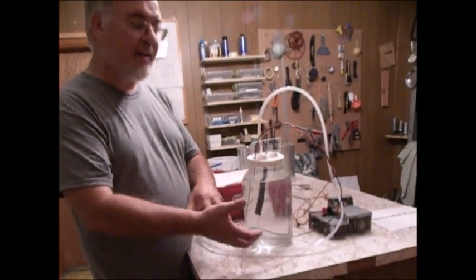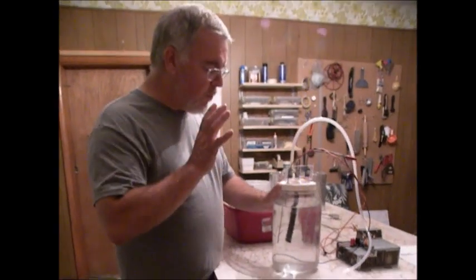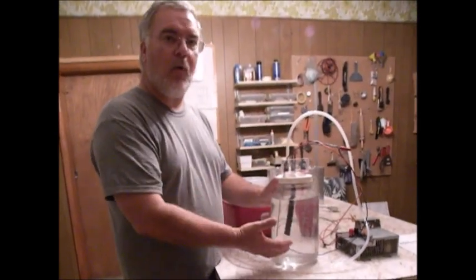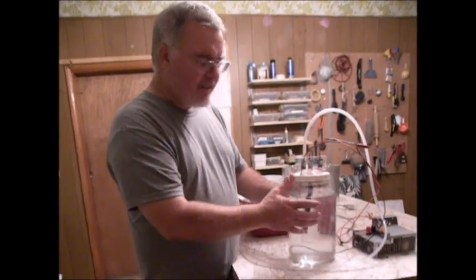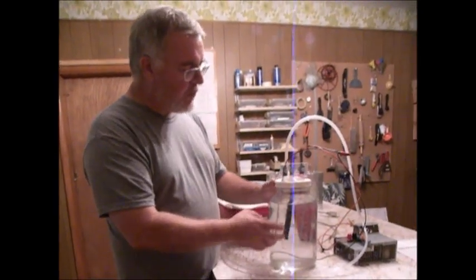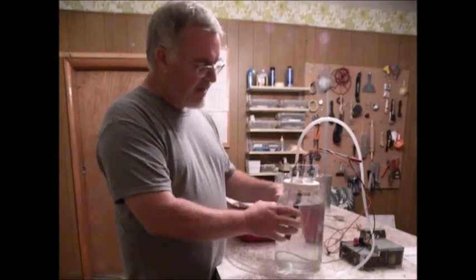It forms like salt crystals, but bigger, more like a rock salt type product. When we filter that out, there's just another step that we have to go through to purify that, as compared to just hot filtering. There is a second video in this section, so if you watch that one, that's going to cover that a whole lot more in detail.